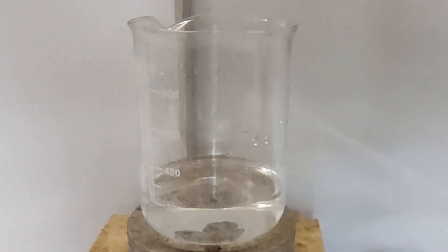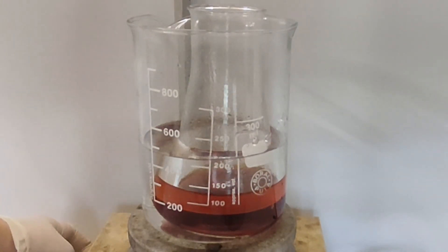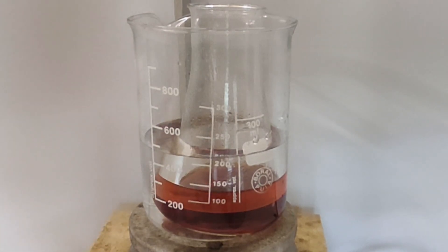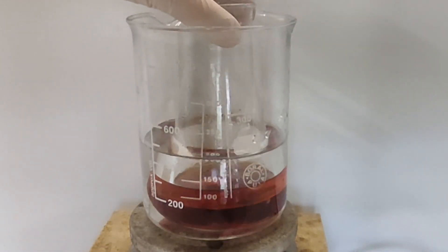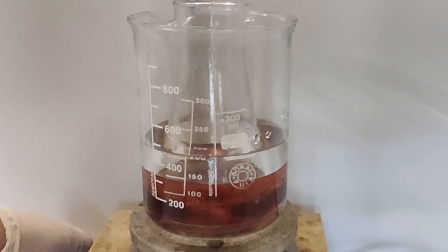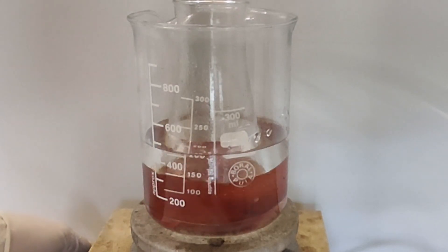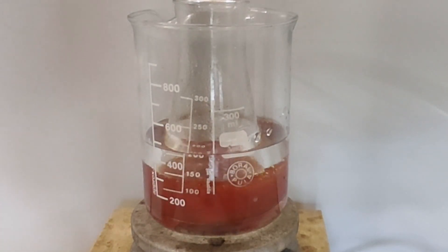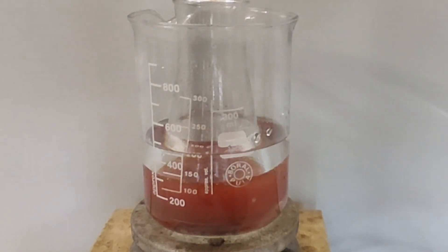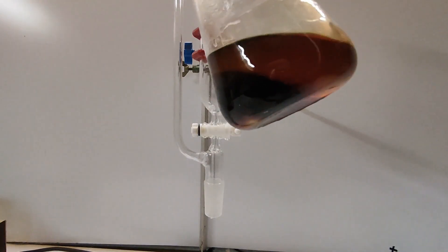After the complete addition of the acid, the flask is left in warm water to react. The layers are separated, and the top nitrotoluene layer is washed multiple times with distilled water, with a final washing with sodium bicarbonate.